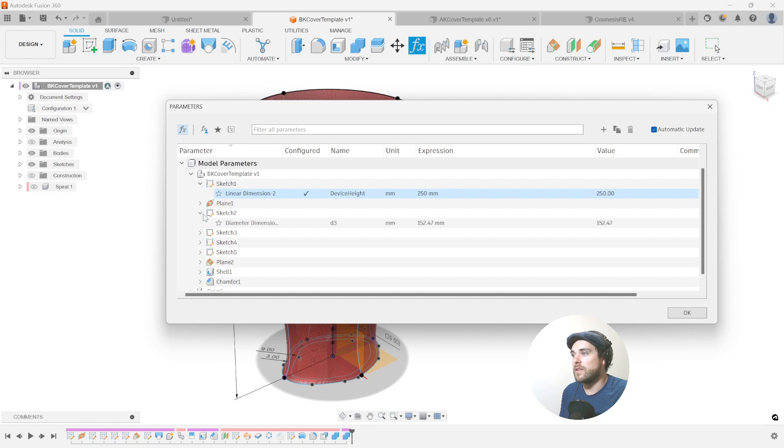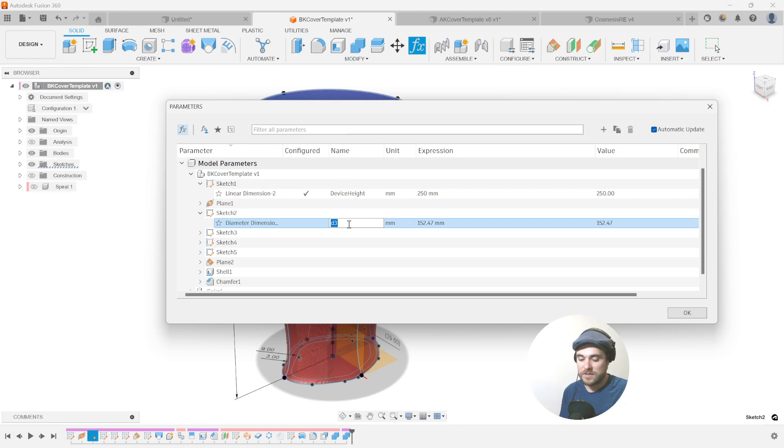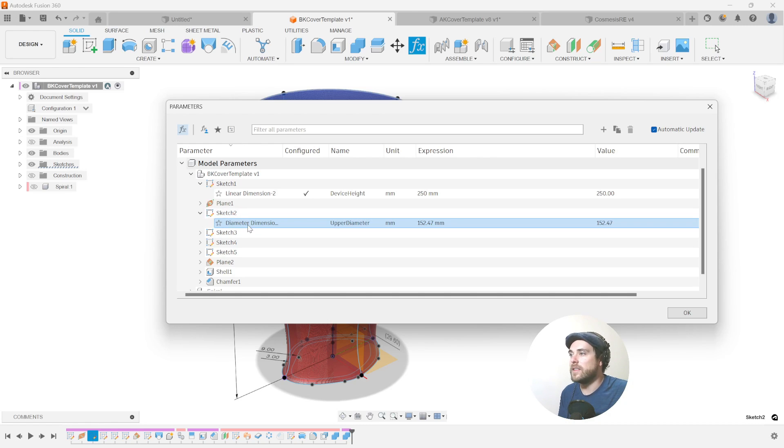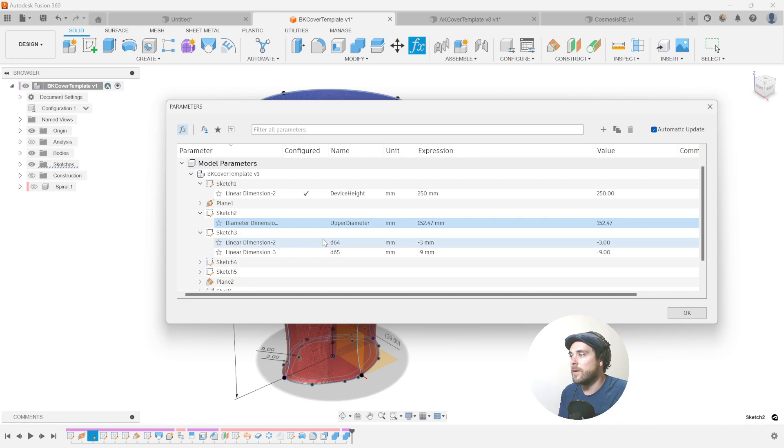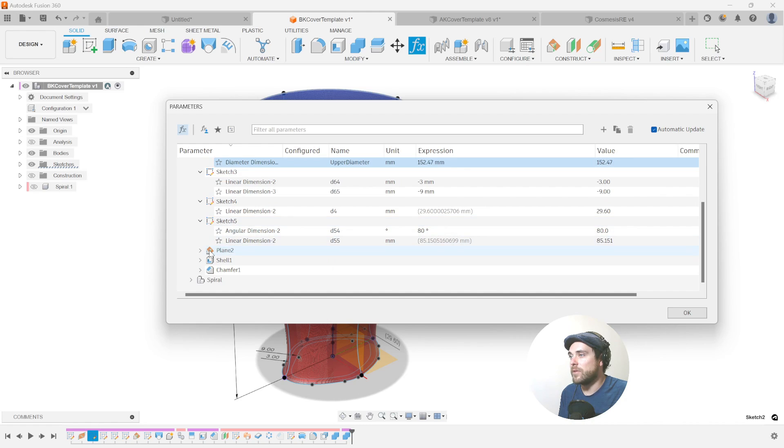If we go into the next Sketch, the diameter at the top is also going to be something that we should try and configure. So I'm going to say D3 is the upper diameter. I'm going to give that a name. And this is just, again, to help us find these dimensions in our sketches that we've put together and be able to call upon them when we want to go and create a configuration.